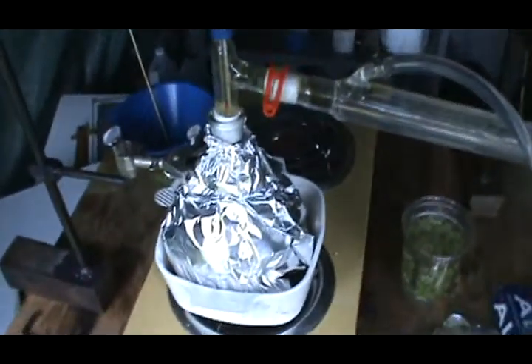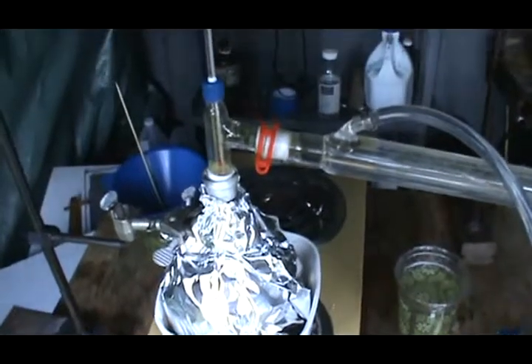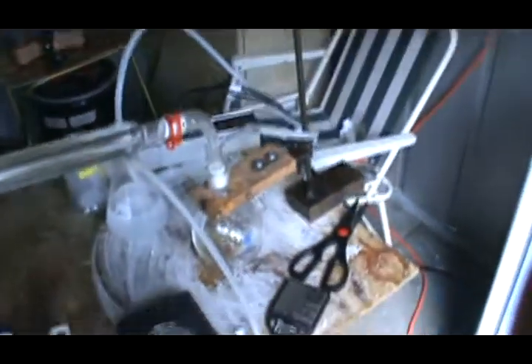I added 182 grams of potassium nitrate and 182 grams of concentrated sulfuric acid to my boiling flask. I hooked up my distillation setup.